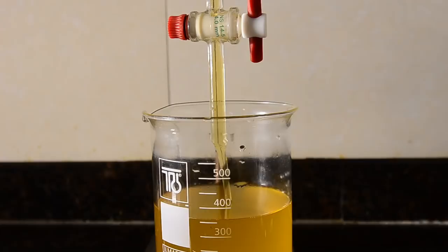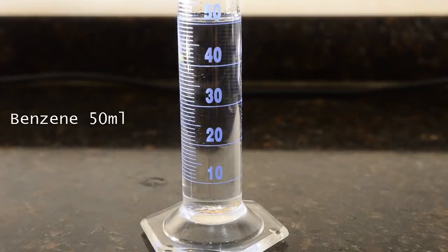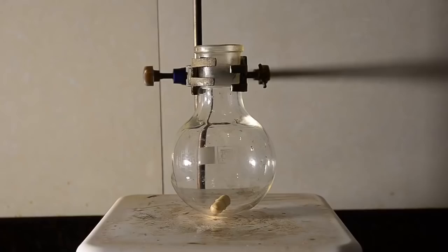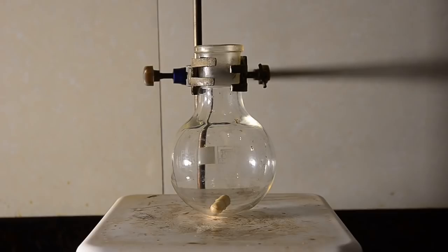Now we're going to perform the second step in the reaction. Measure out 50 mils of dry benzene. Again this is more than we need for the reaction because we want to minimize dual alkylations. Set up a dry 250 ml flask equipped with good magnetic stirring and add the benzene to the flask.